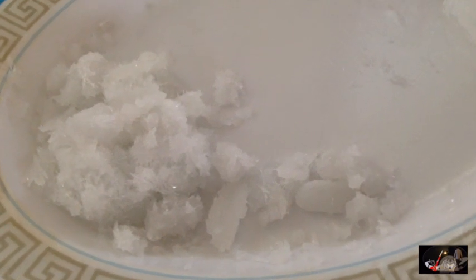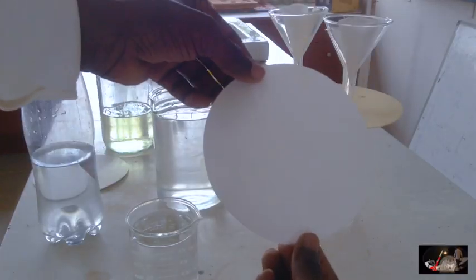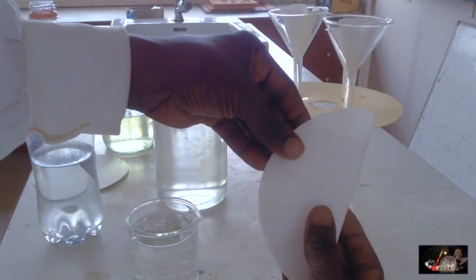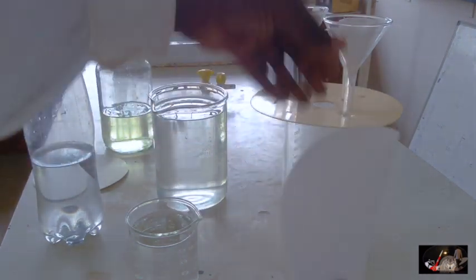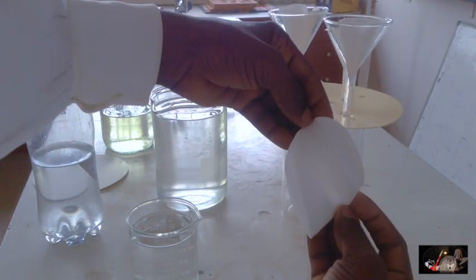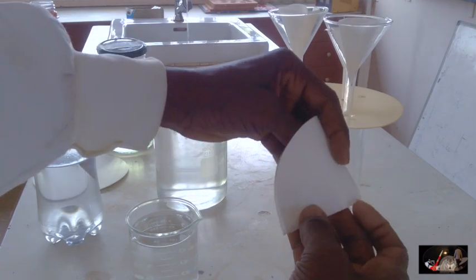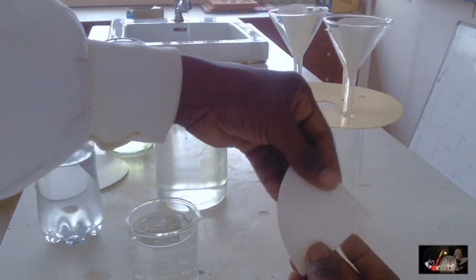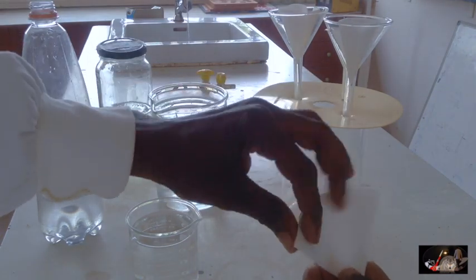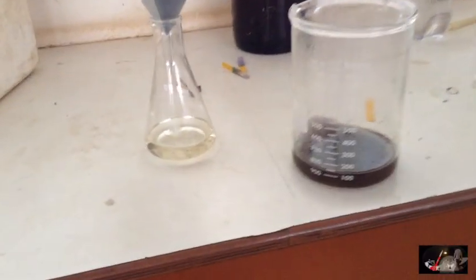The crystals should be much clearer. However, this wire contamination should be removed. To do this, I have to redissolve the crystals and have the solution filtered. This is how I fold the filter paper before placing it inside the funnel. The more folds you make, the faster the solution runs through it.